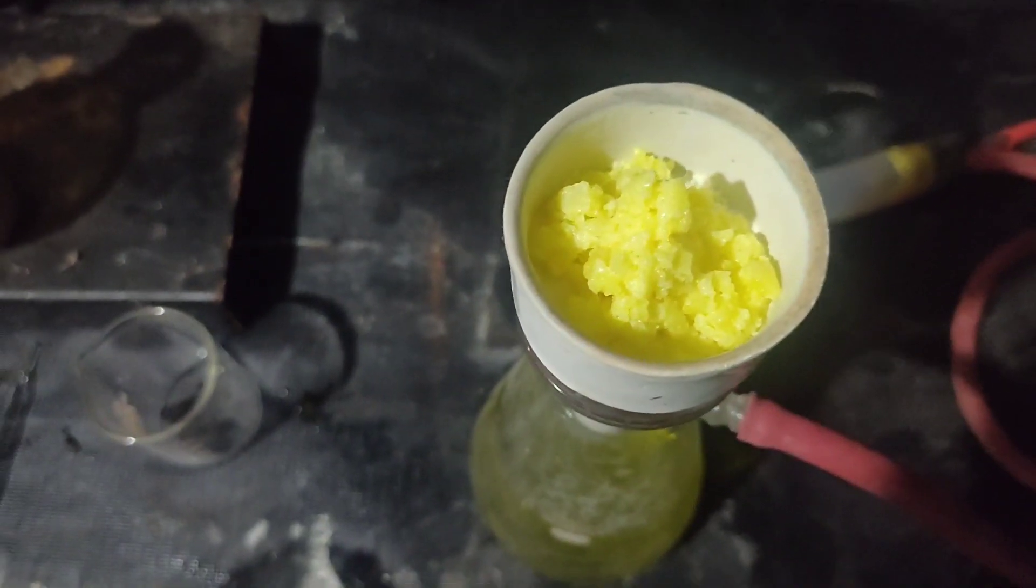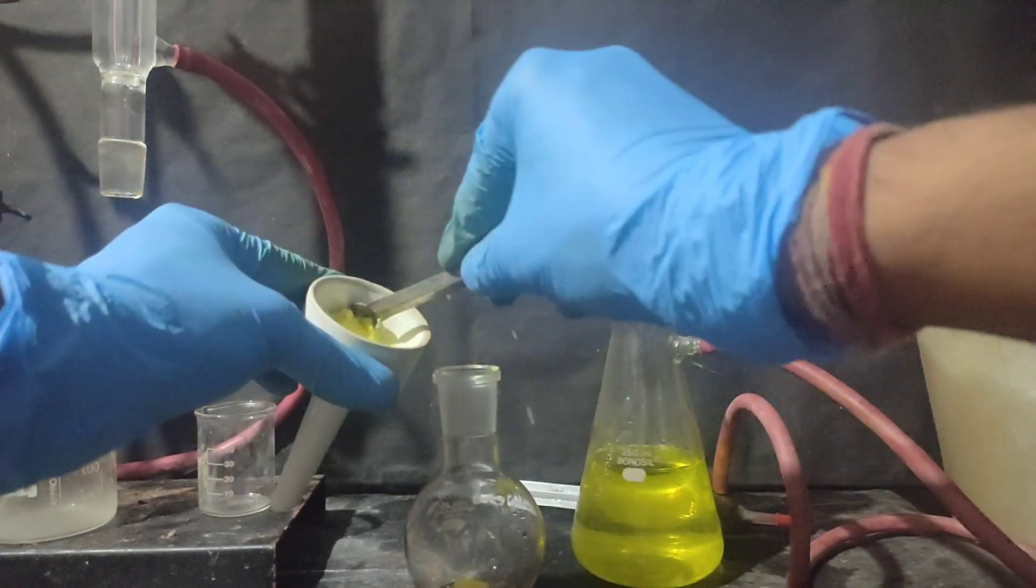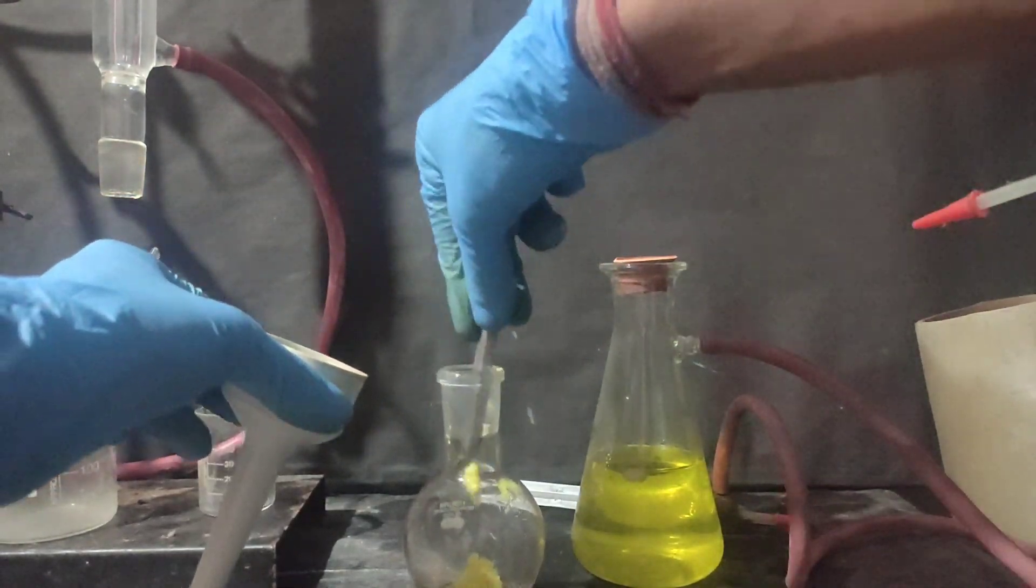This is the crude meta-dinitrobenzene. Now, to purify it, I will be recrystallizing it from 95% alcohol.